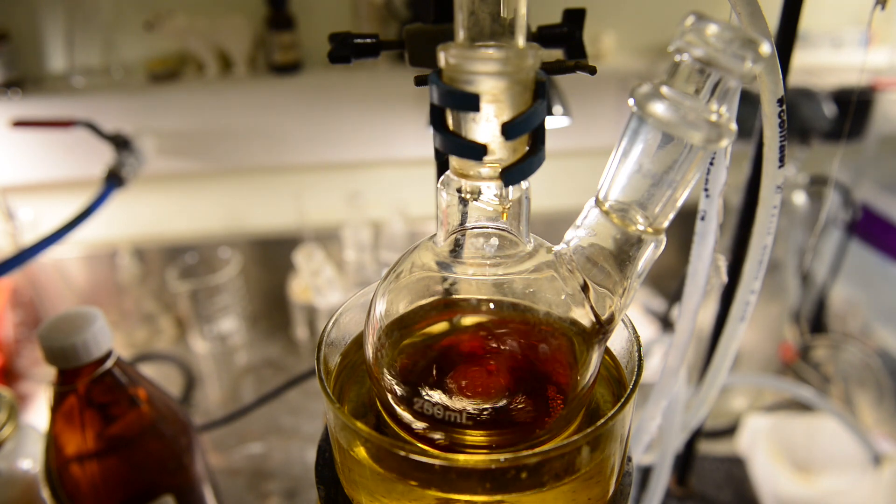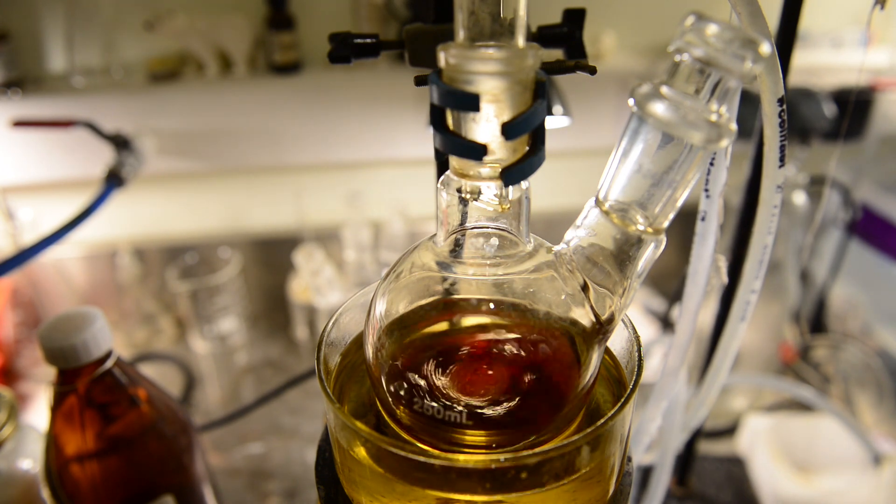After some time, liquid in the flask becomes transparent red. But as we can see it becomes opaque again.